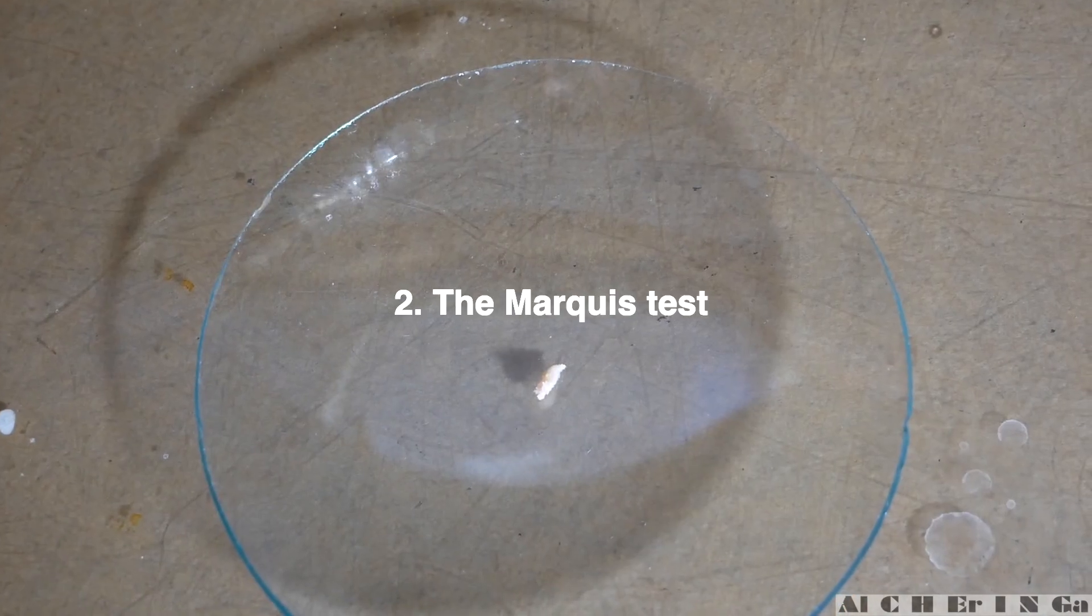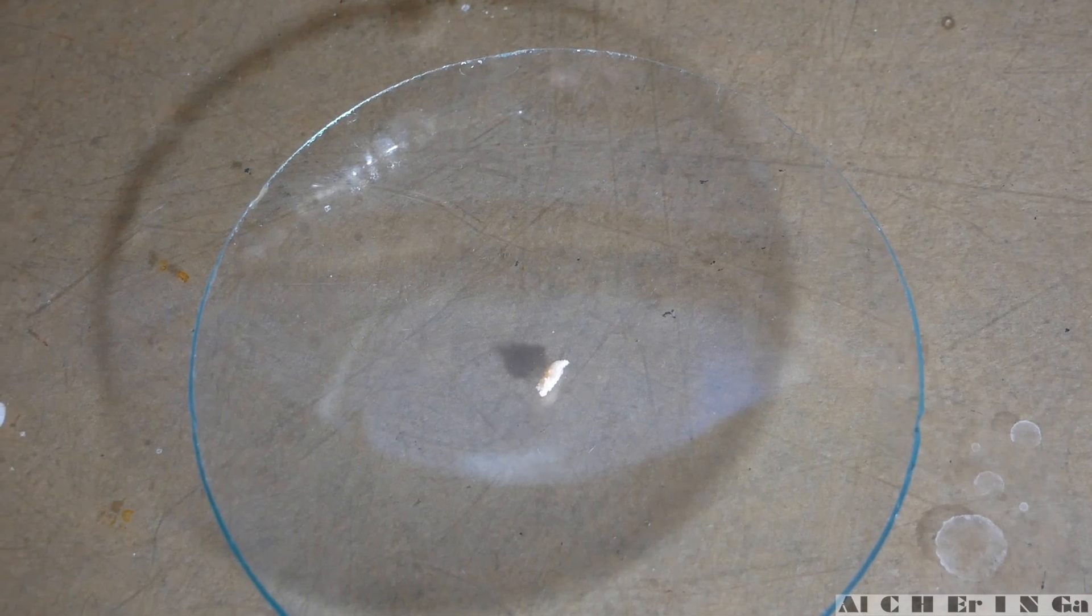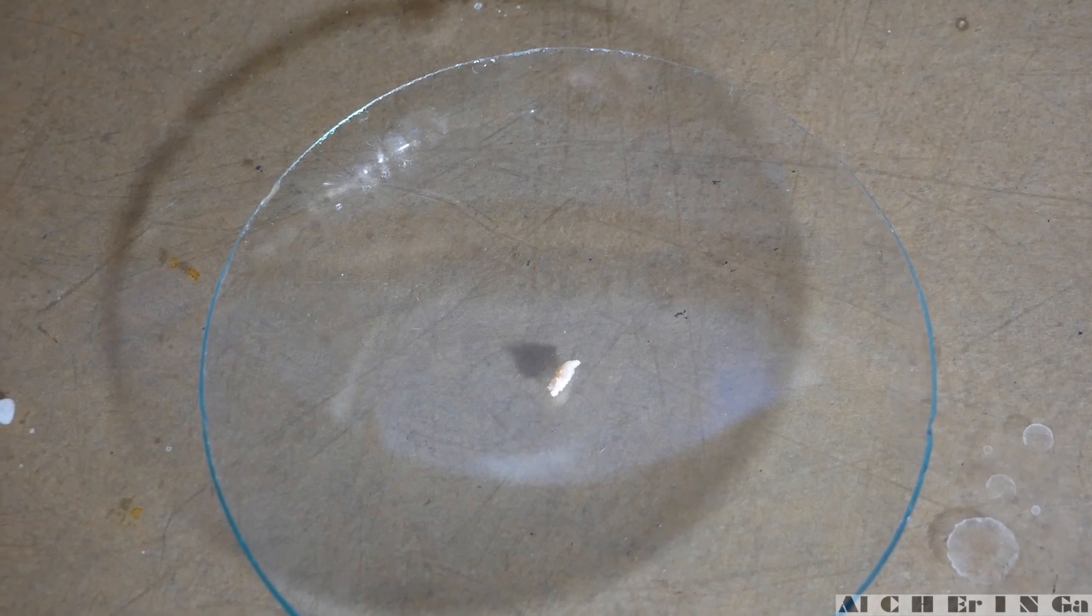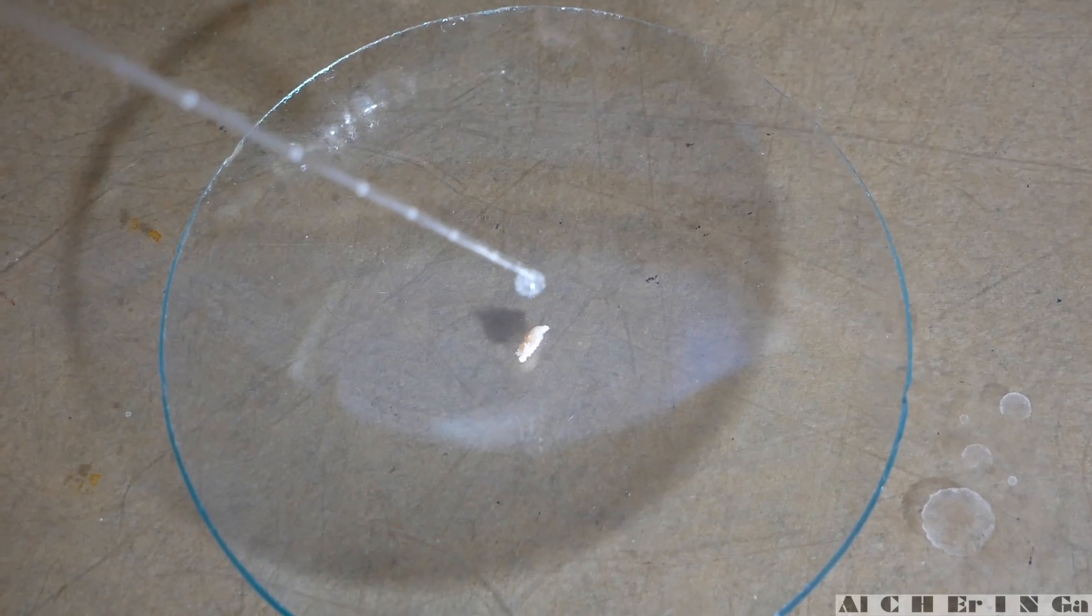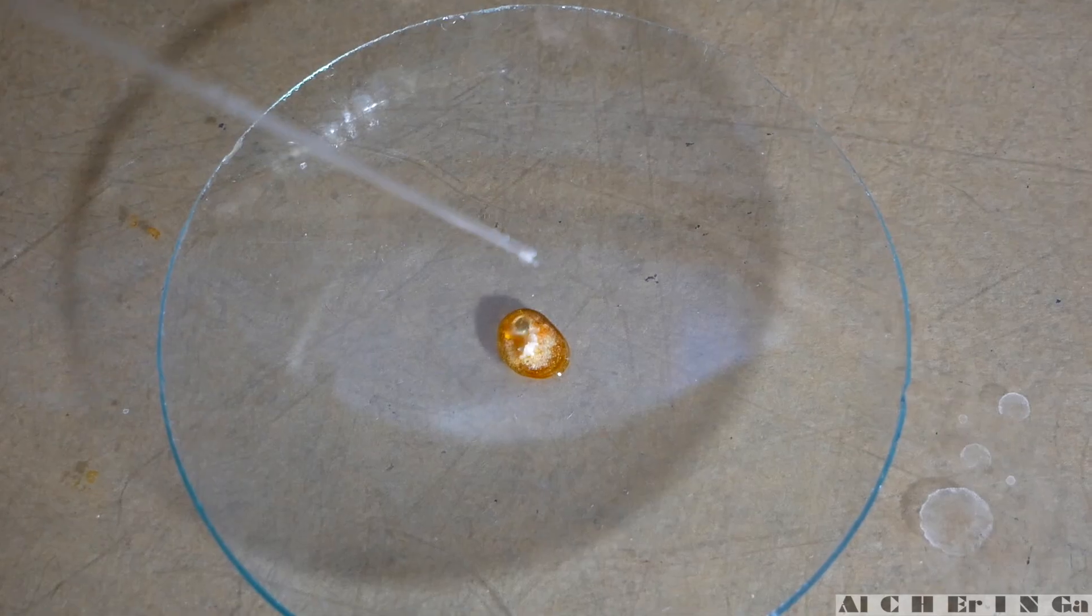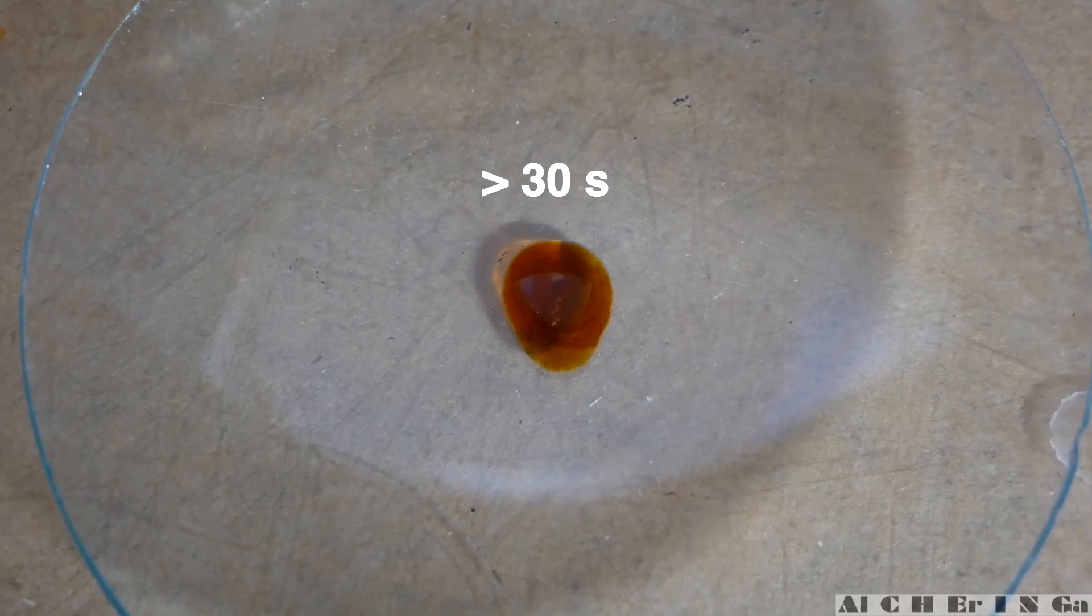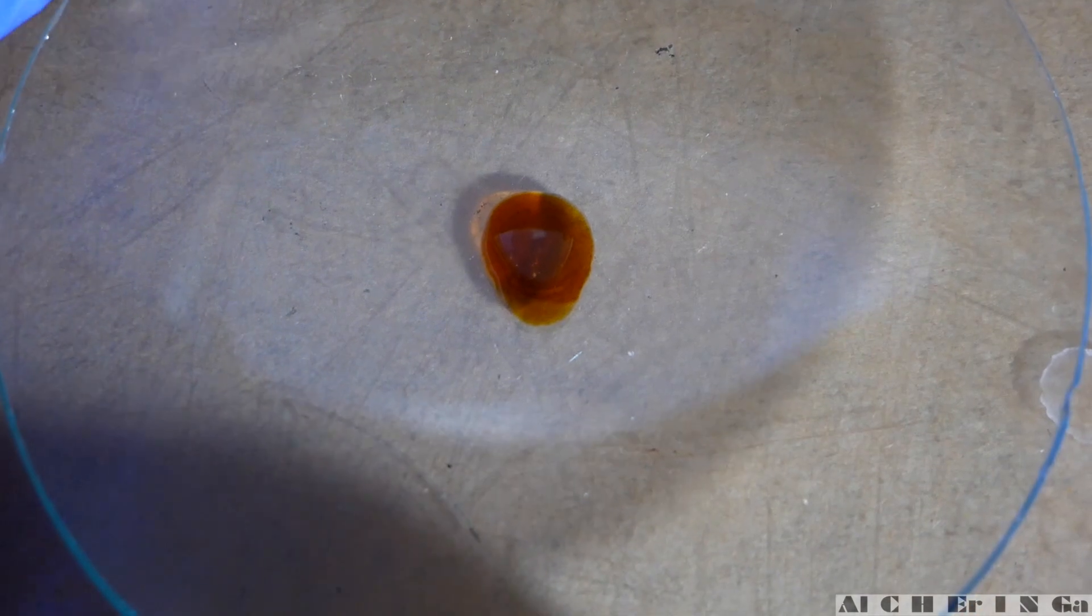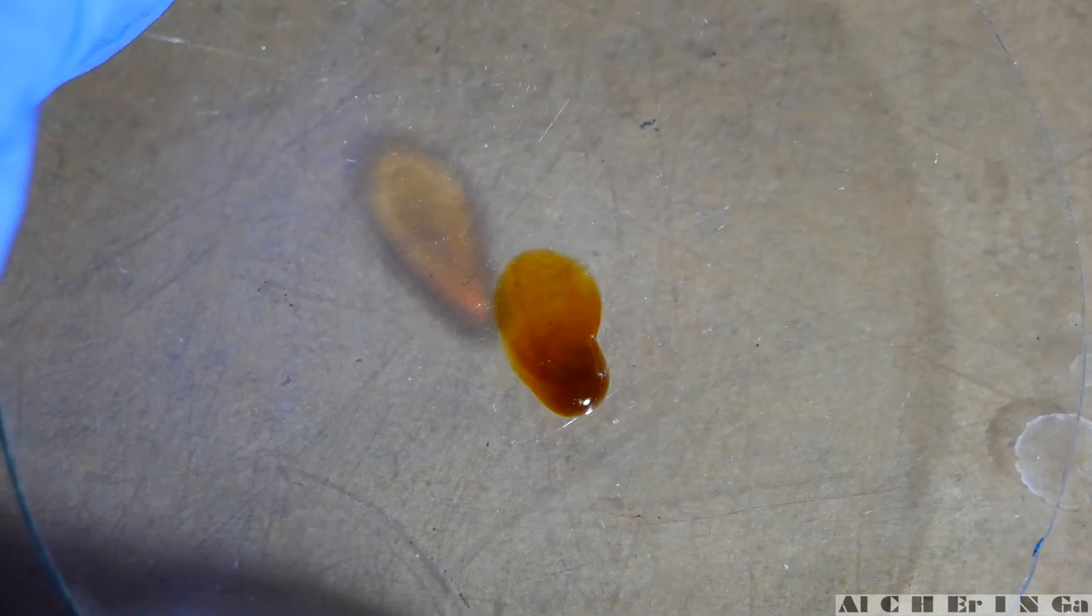Now, the marquis test. This reagent is composed of a mixture of formaldehyde and concentrated sulfuric acid. A small amount of the product was placed onto a watch glass, and a few drops of the reagent was added onto the material. In a few seconds there is fizzing and a color change from a clear to an orange hue. After 30 seconds, the fizzing has subsided, and it seems to have a brown tint. This is a positive test for 2-amino-1-phenyl-propane hydrochloride.